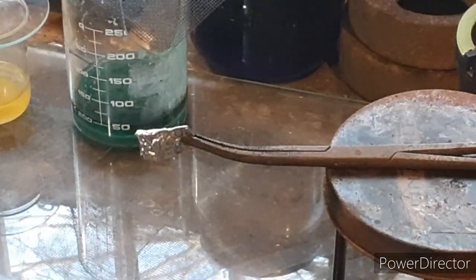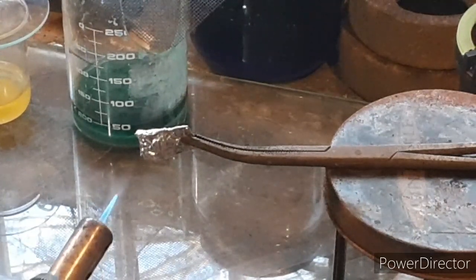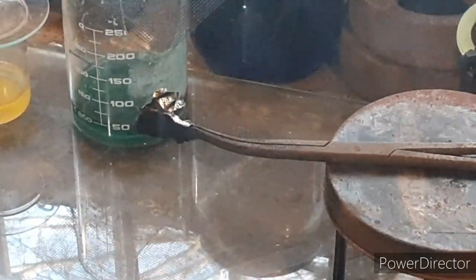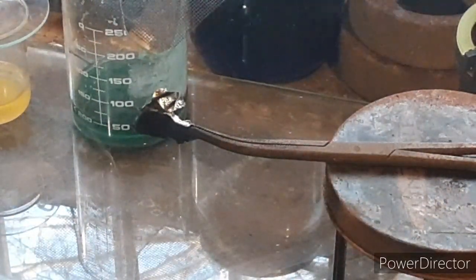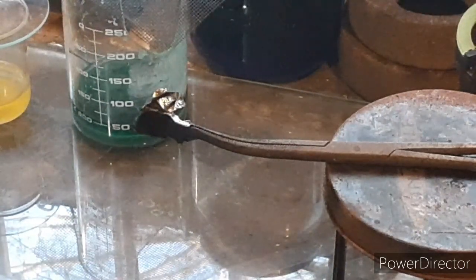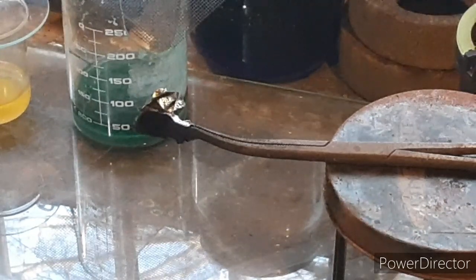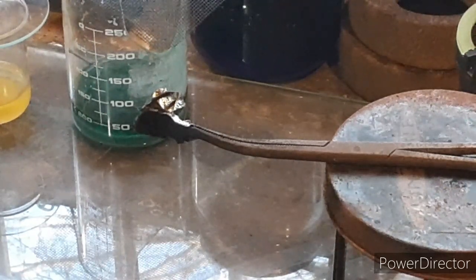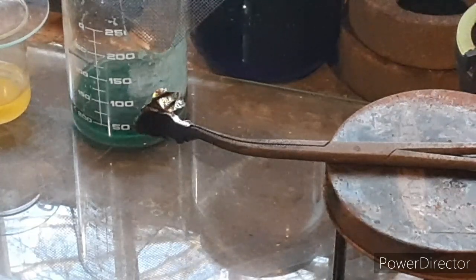Okay, there's our trinitrophenol — same amount, 100 milligrams. And that was loud. As you see, the picric acid will actually detonate on its own. So for you guys that were curious about the difference between trinitro and dinitrophenol — and I believe I had said to the guy who wanted to see this as to why I was not too excited about doing dinitrophenol — because it's just literally a poor energetic and even worse as a primary. Now you see why.